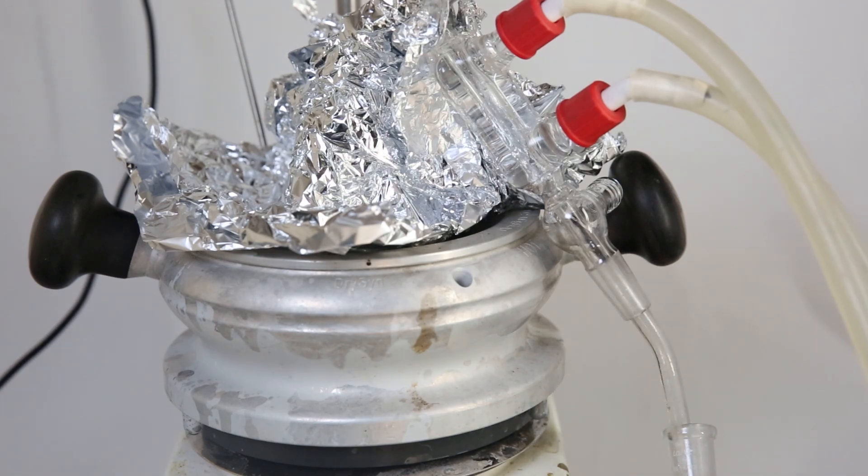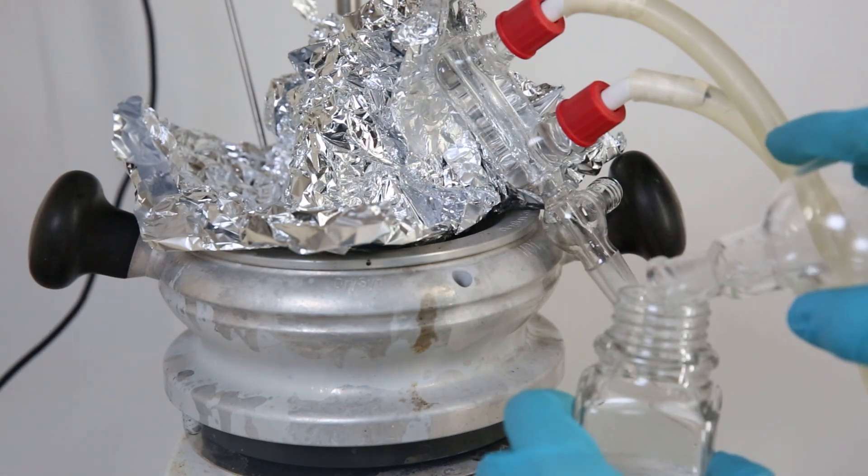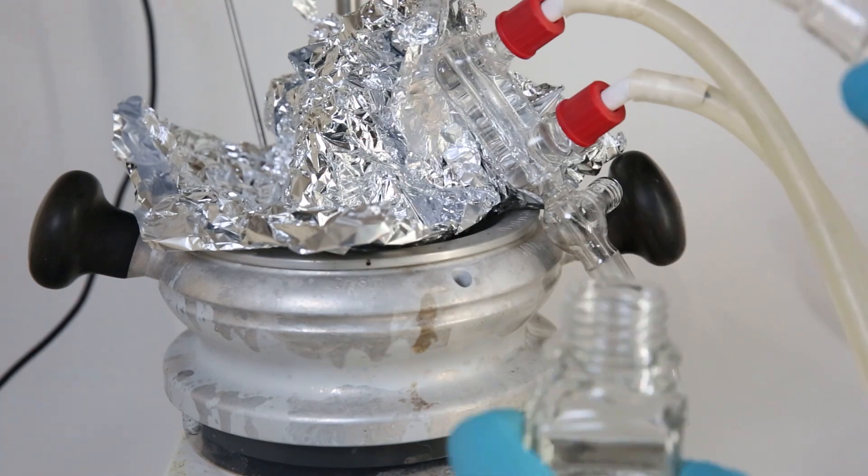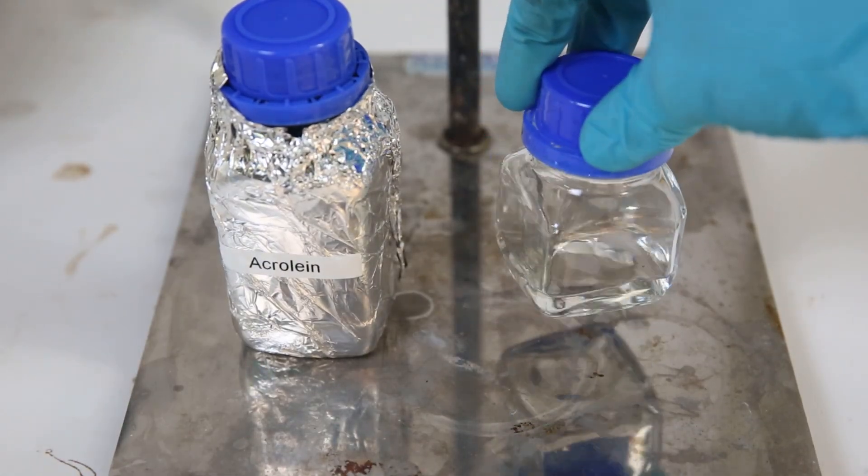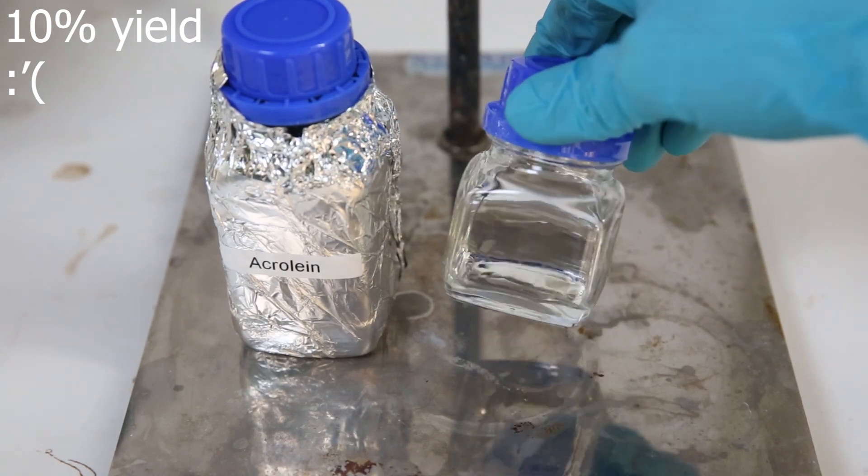When the temperature started to increase past that, I poured the contents out into a bottle containing some hydroquinone. So the final yield of Acrolein is a sad 10%. But at least I also have a bunch of tar.